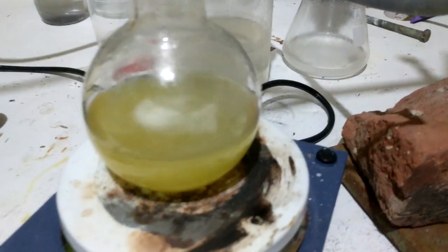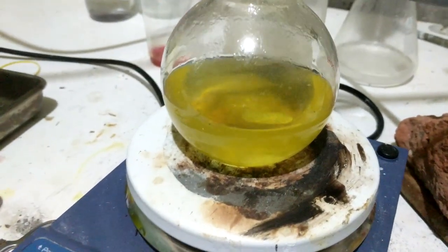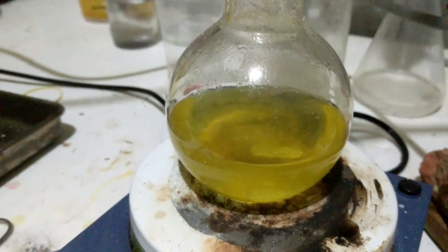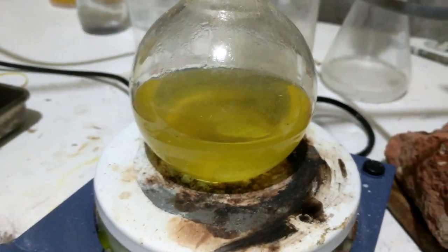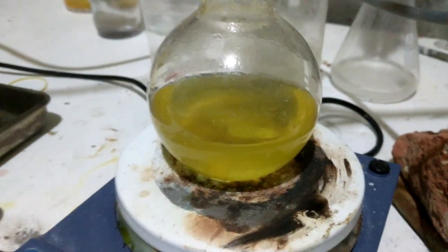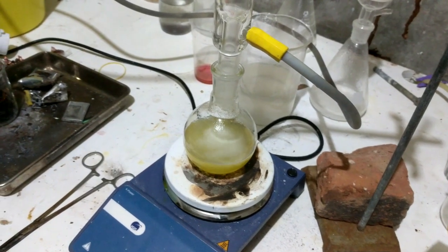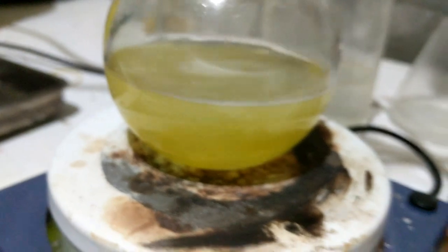It's giving off a lot of gas even though it's not boiling yet. I feel like this is a bad sign because I don't know why it would be giving off gas at this point — assuming it's all neutralized, that gas can only really be nitrogen, and that's our product decomposing. It just seems like it's all just bubbling away and going off into the atmosphere.